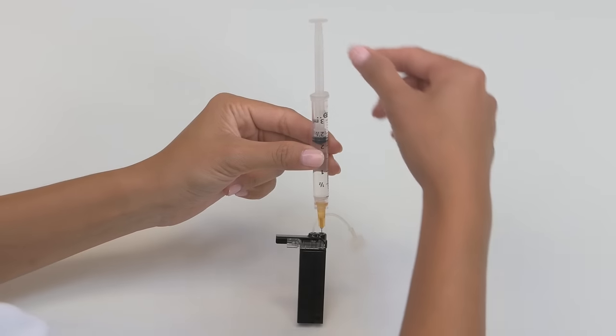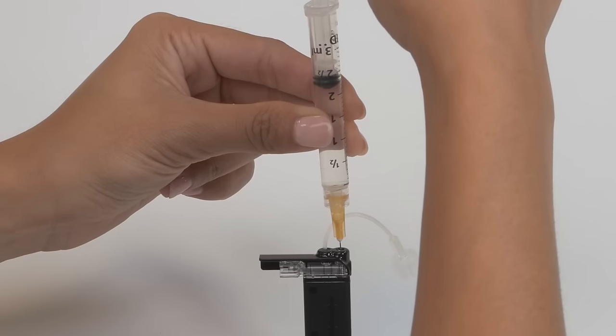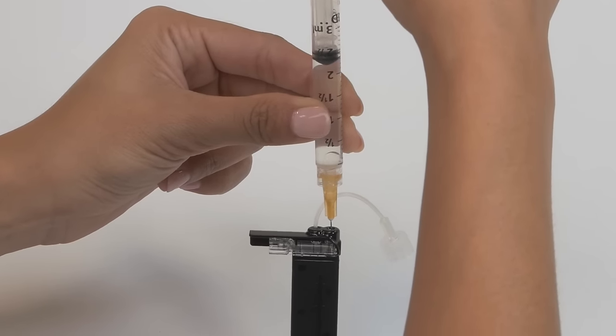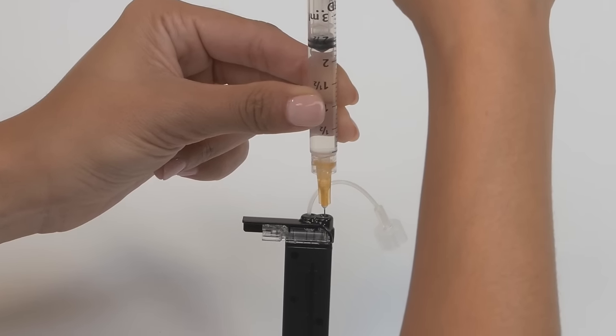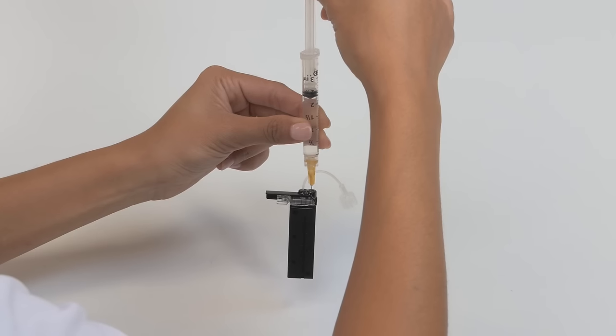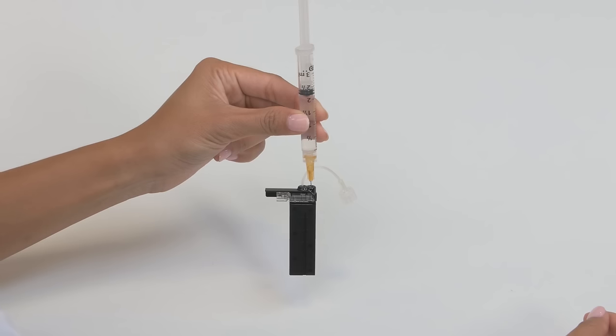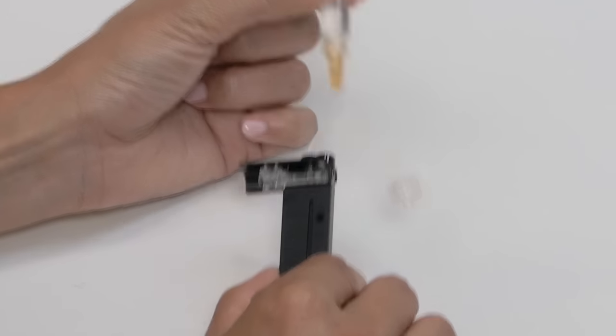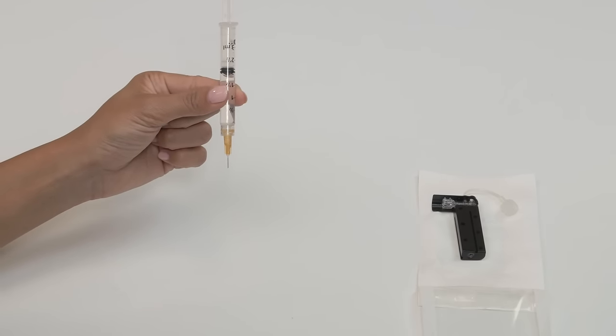Keeping your cartridge and syringe both vertical, slowly pull up on the plunger until it is fully retracted, in order to remove any residual air in the cartridge. You'll probably see some bubbles during this step. With the needle still in the cartridge, gently release the plunger. Air pressure will pull it back to a neutral position, but will not push any air back into the cartridge. Now you can remove the needle from the fill port. This step removes any air that may have been trapped in the cartridge bag.